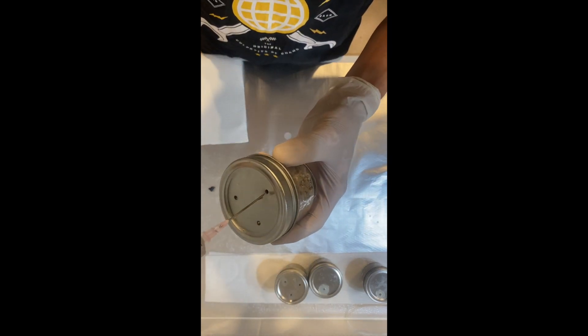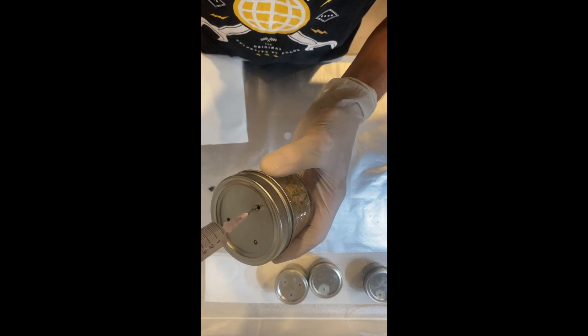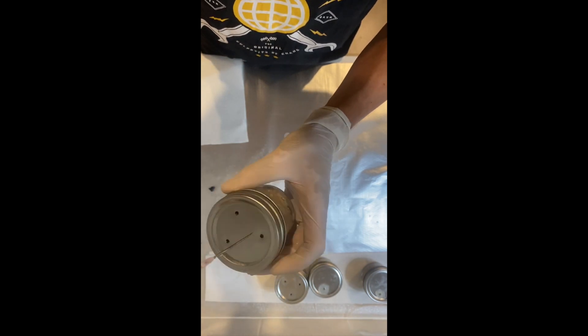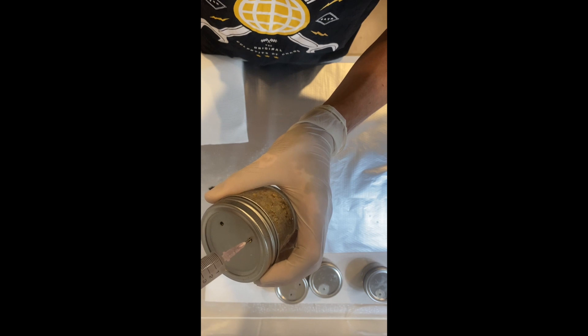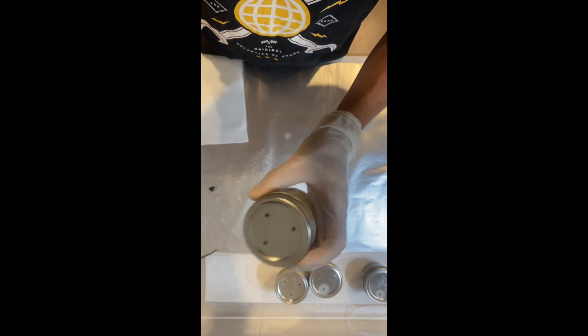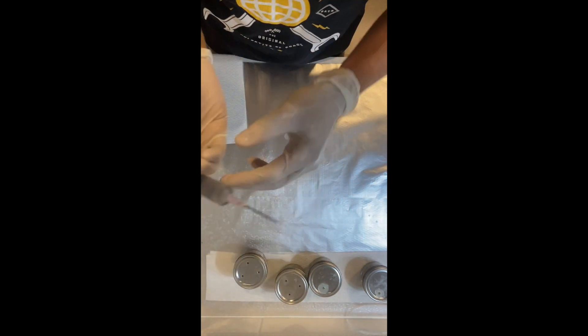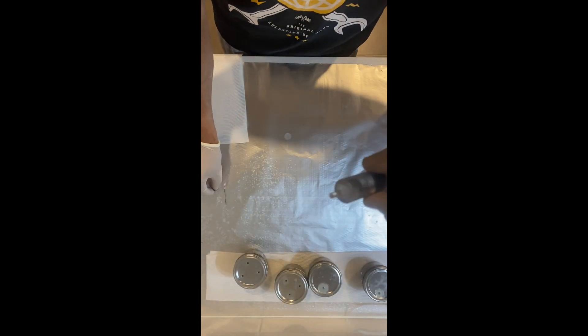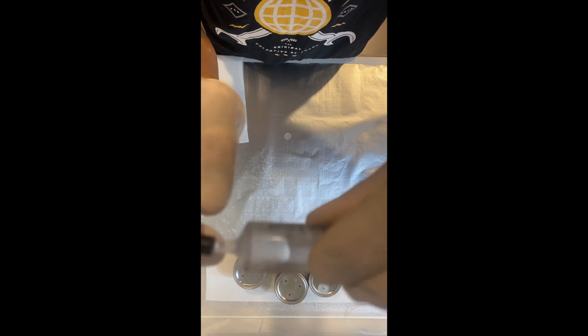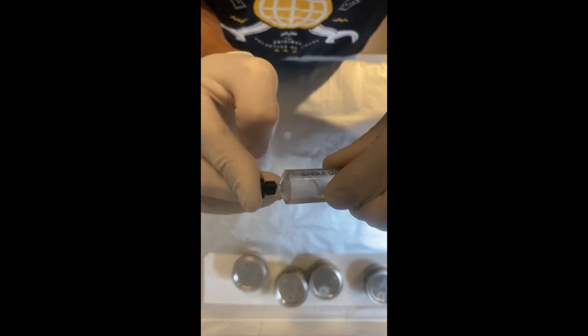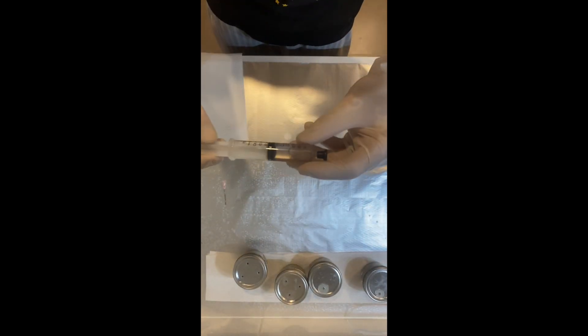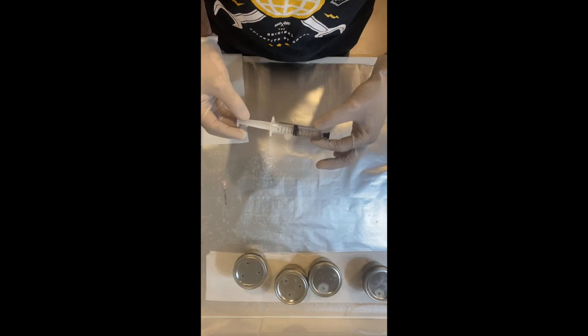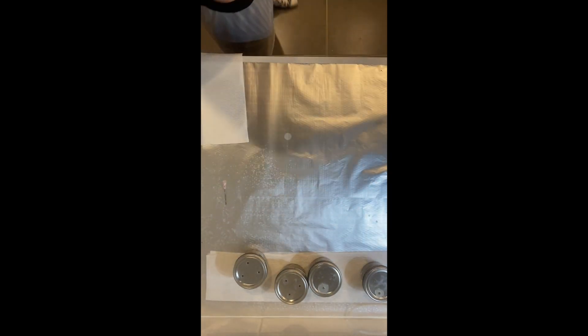Alright, last one now guys. One, two, three. Now what we can actually do is pop the needle off that, put our rubber stopper back on, and that can go back in some foil and you can use that for your next few jars. I'm just going to put that off to the side.